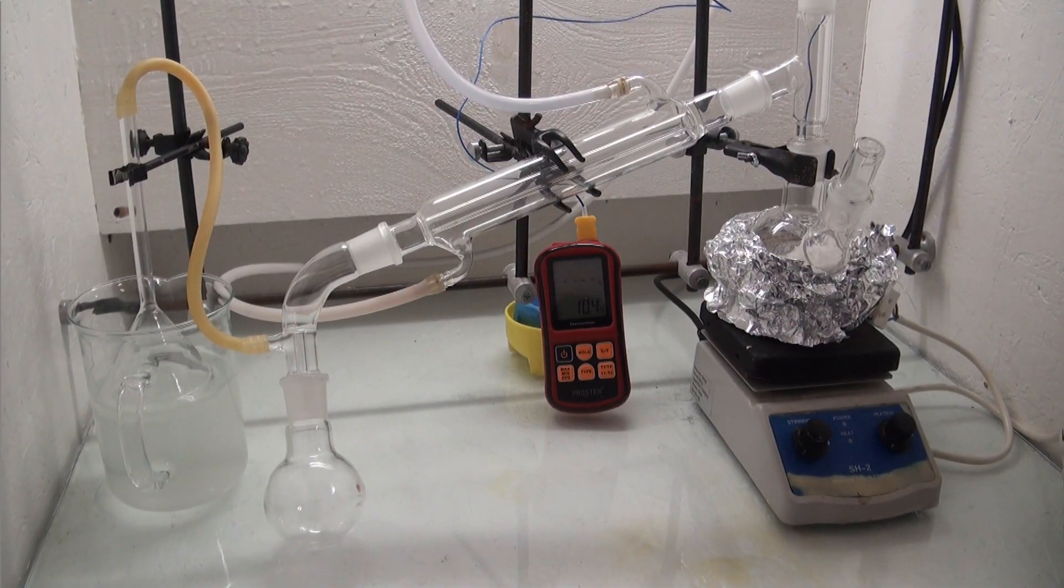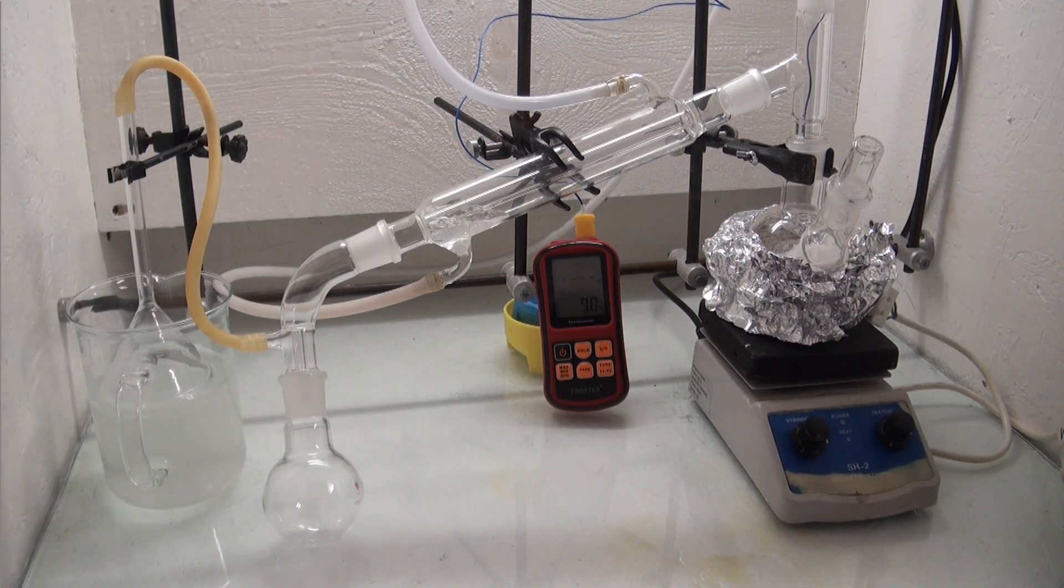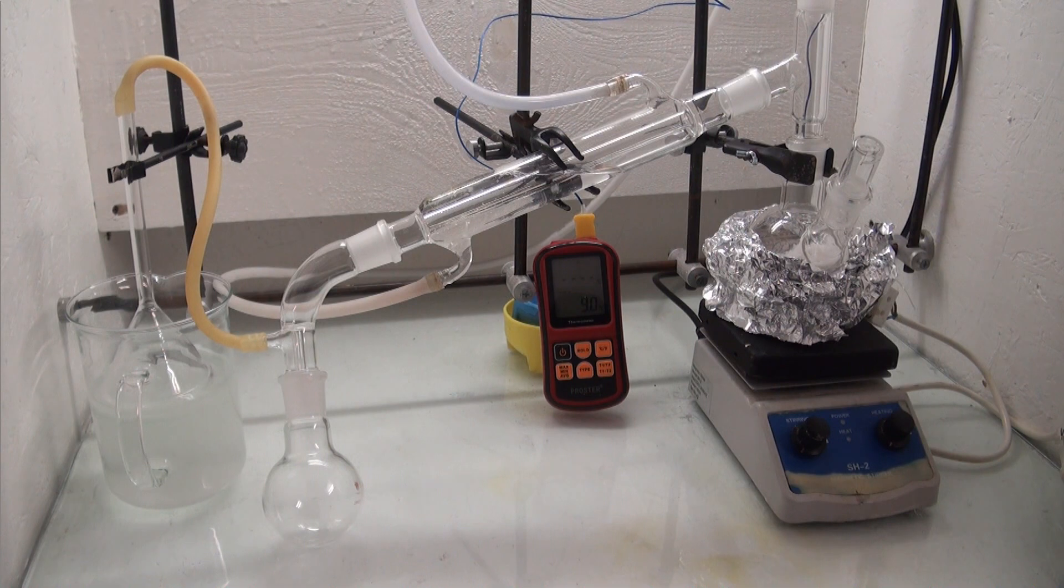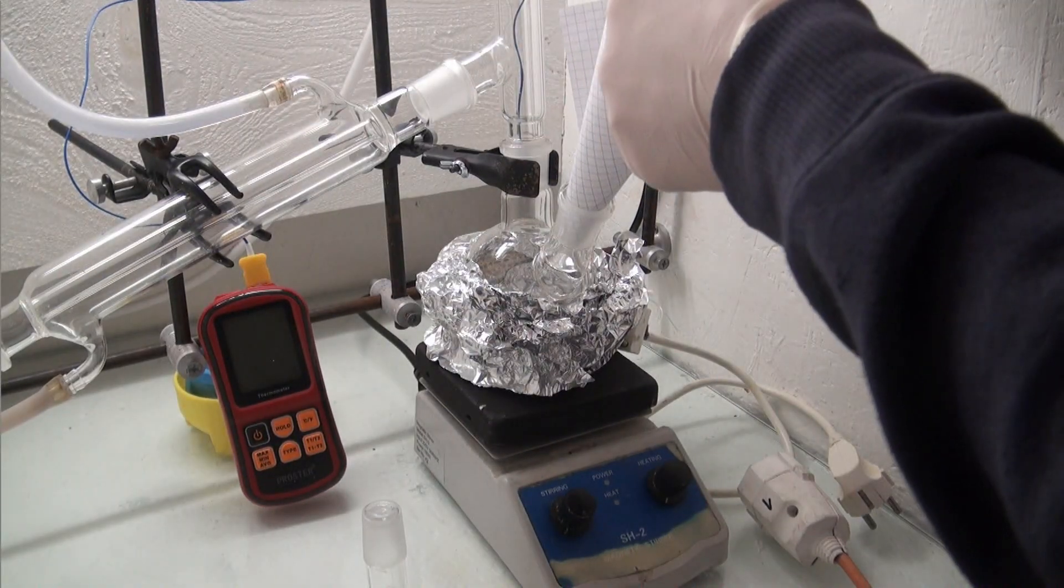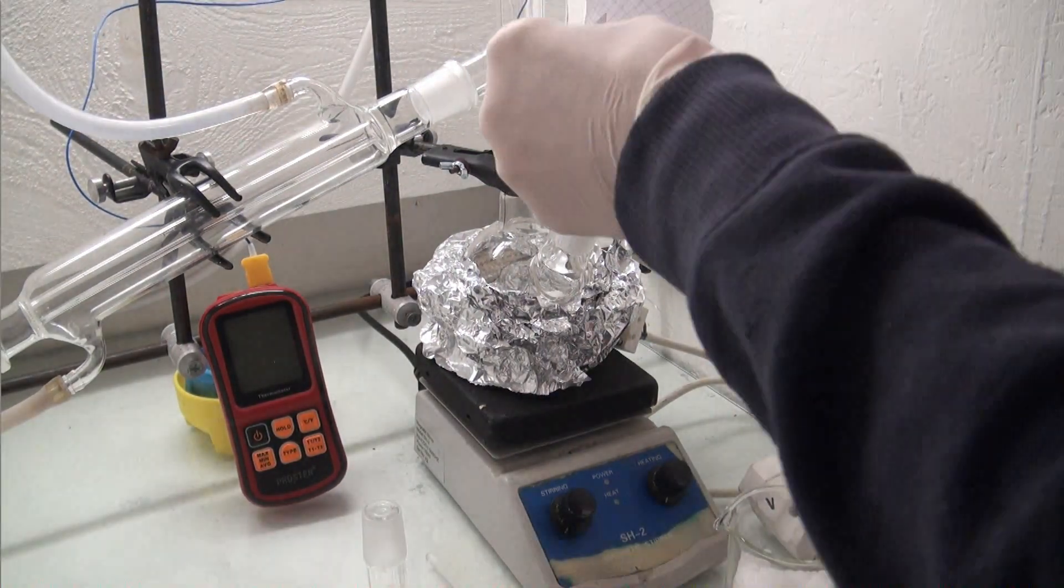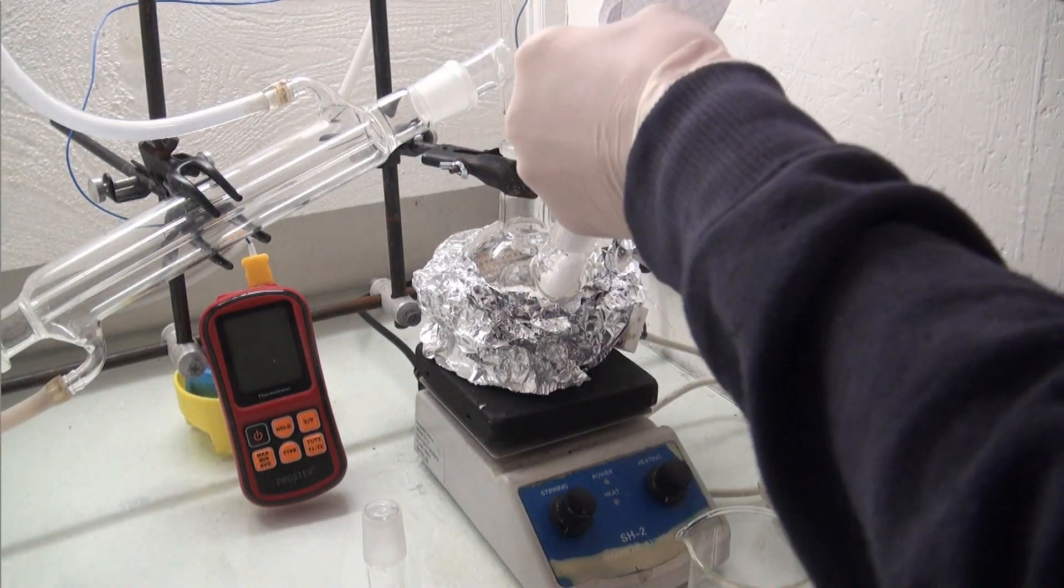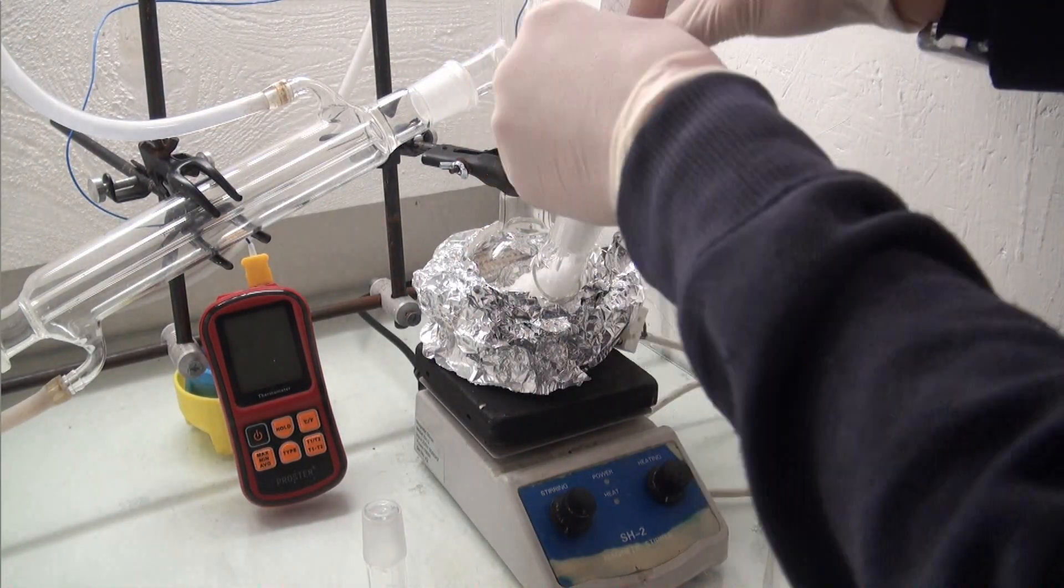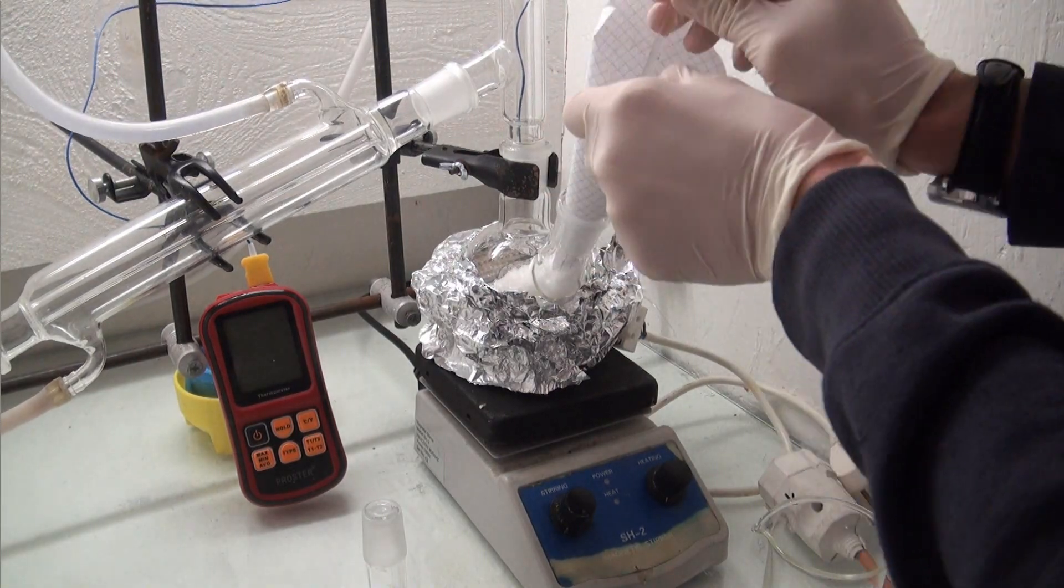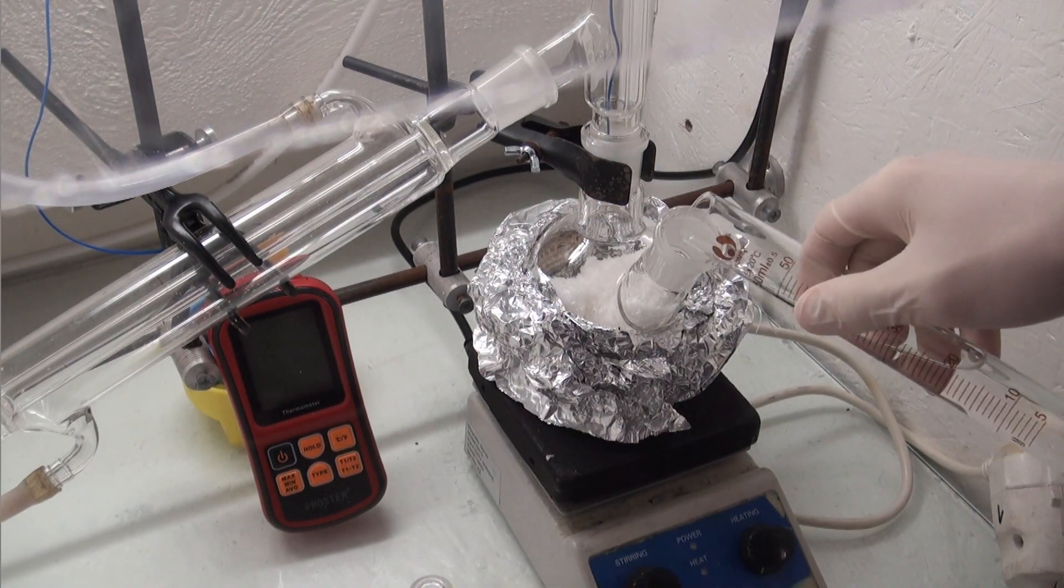I started this experiment with a simple distillation setup connected to a gas trap containing a sodium hydroxide solution against nitric acid vapors and nitrogen dioxide gas. One mole of potassium nitrate was added into the flask. To this, 0.4 moles of phosphoric acid was added.